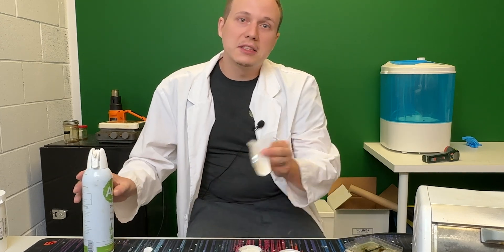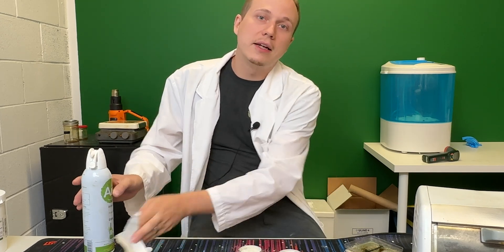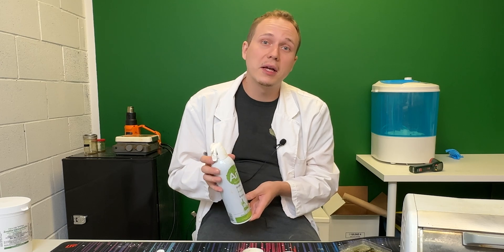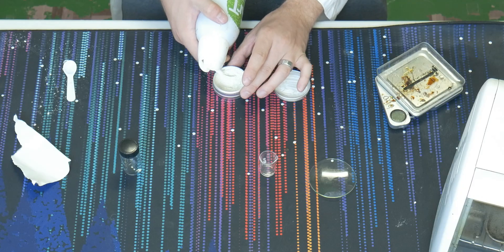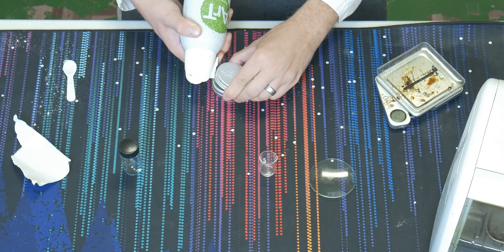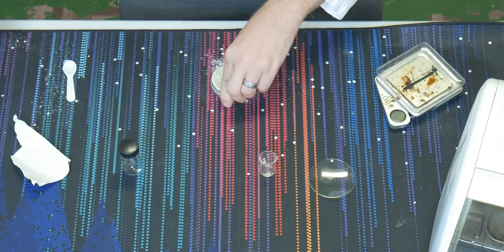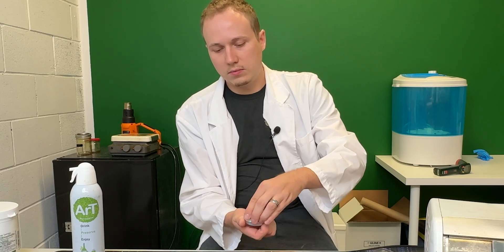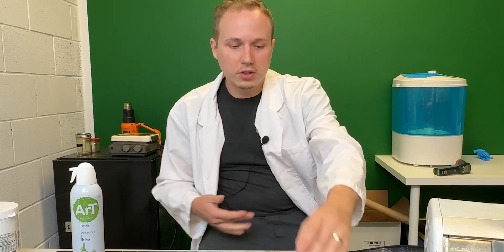Some people recommend wrapping it tightly in foil, and I'll show you that. But for this I'm going to use some Argon — this isn't totally necessary as there are other methods, but this is what I would recommend as it's a lot easier. I'll spray it in there, put the lid on tight, and that's good to go.